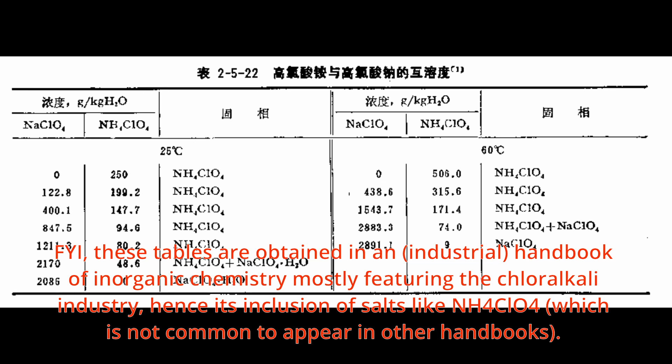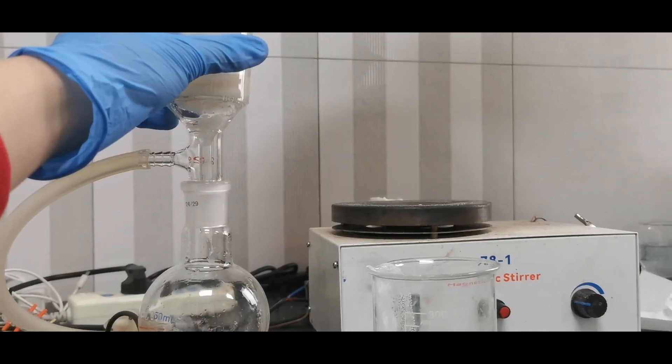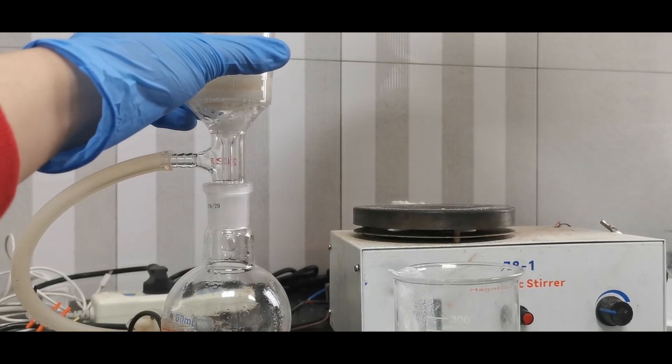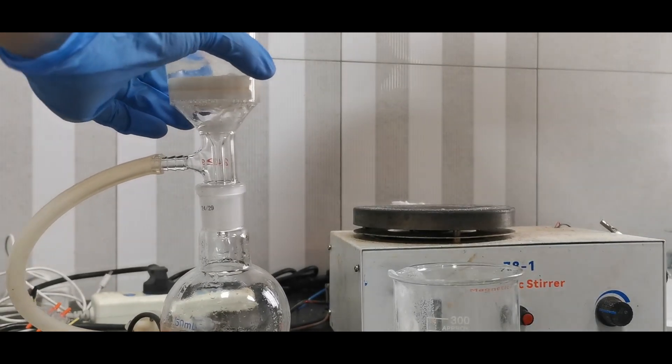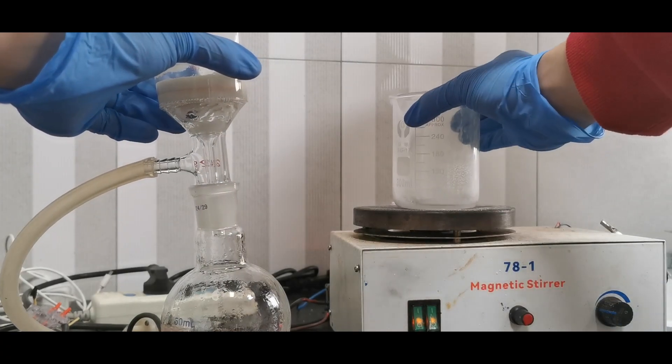To minimize this, I put a watch glass on the beaker to minimize loss of water vapor, as a decreased amount of water may increase the amount of ammonium chloride in the product. After around half an hour of boiling, I quickly suction-filtered the mixture to remove the sodium chloride. Suction filtration is necessary here, as the ammonium perchlorate quickly crystallizes when the temperature starts to drop.